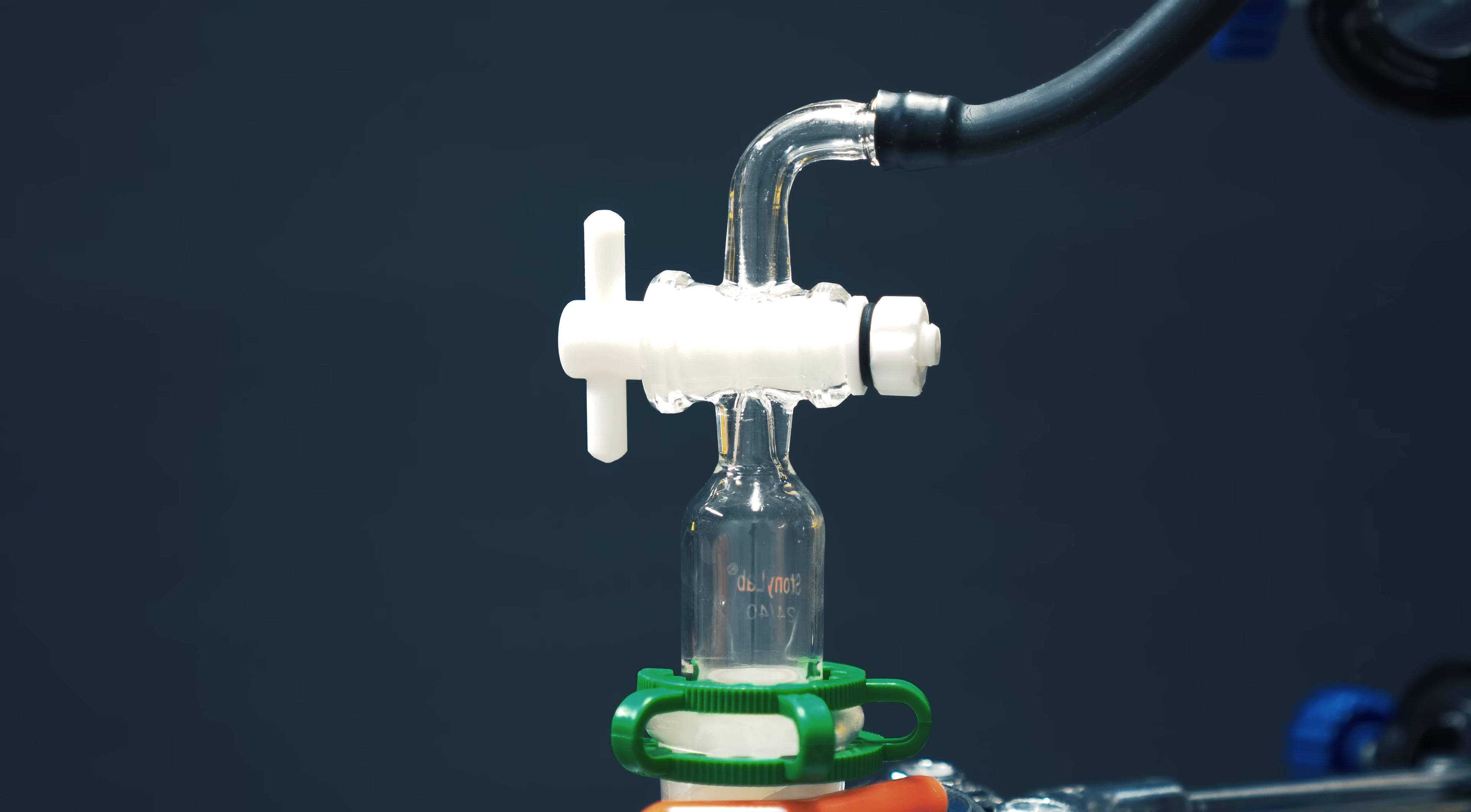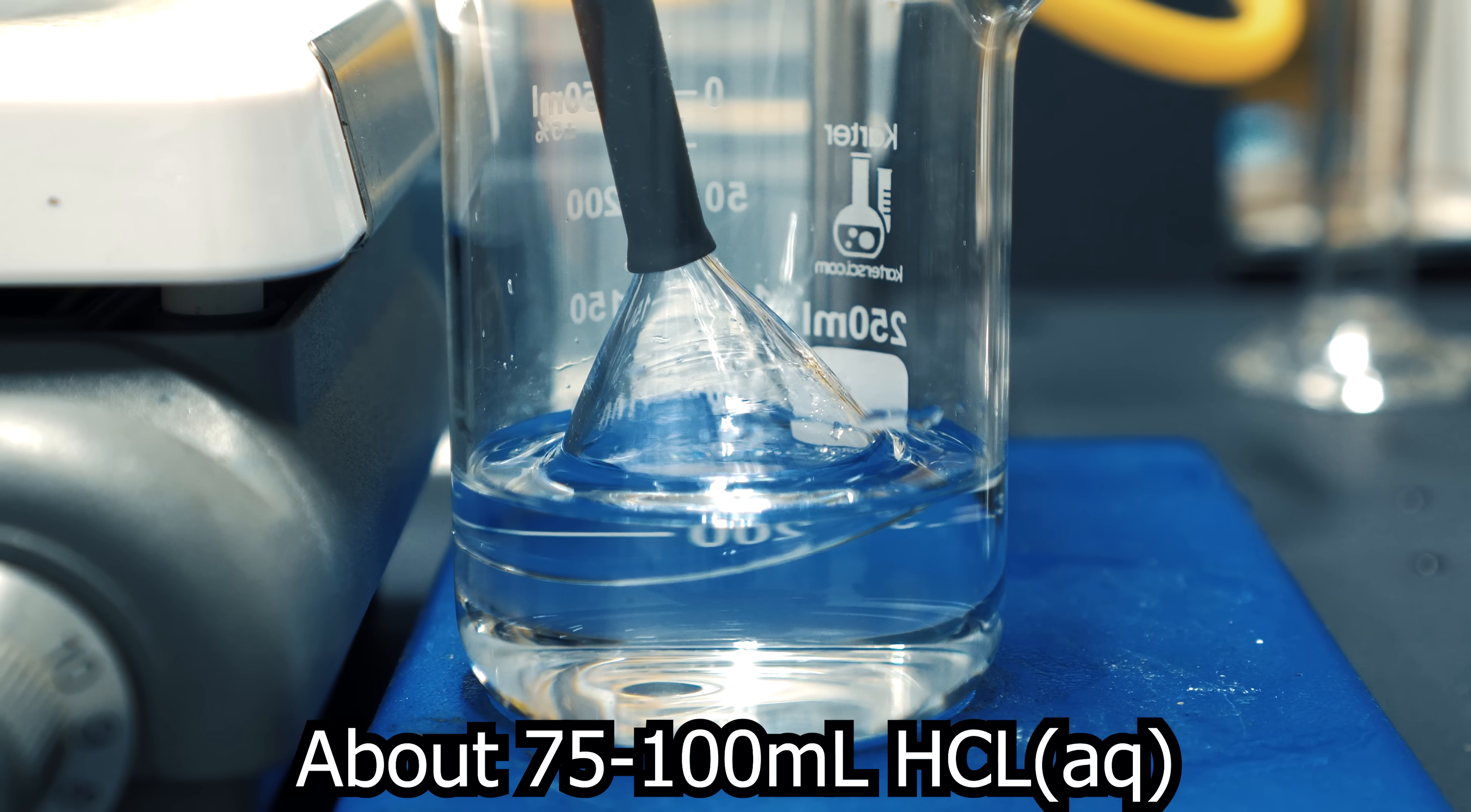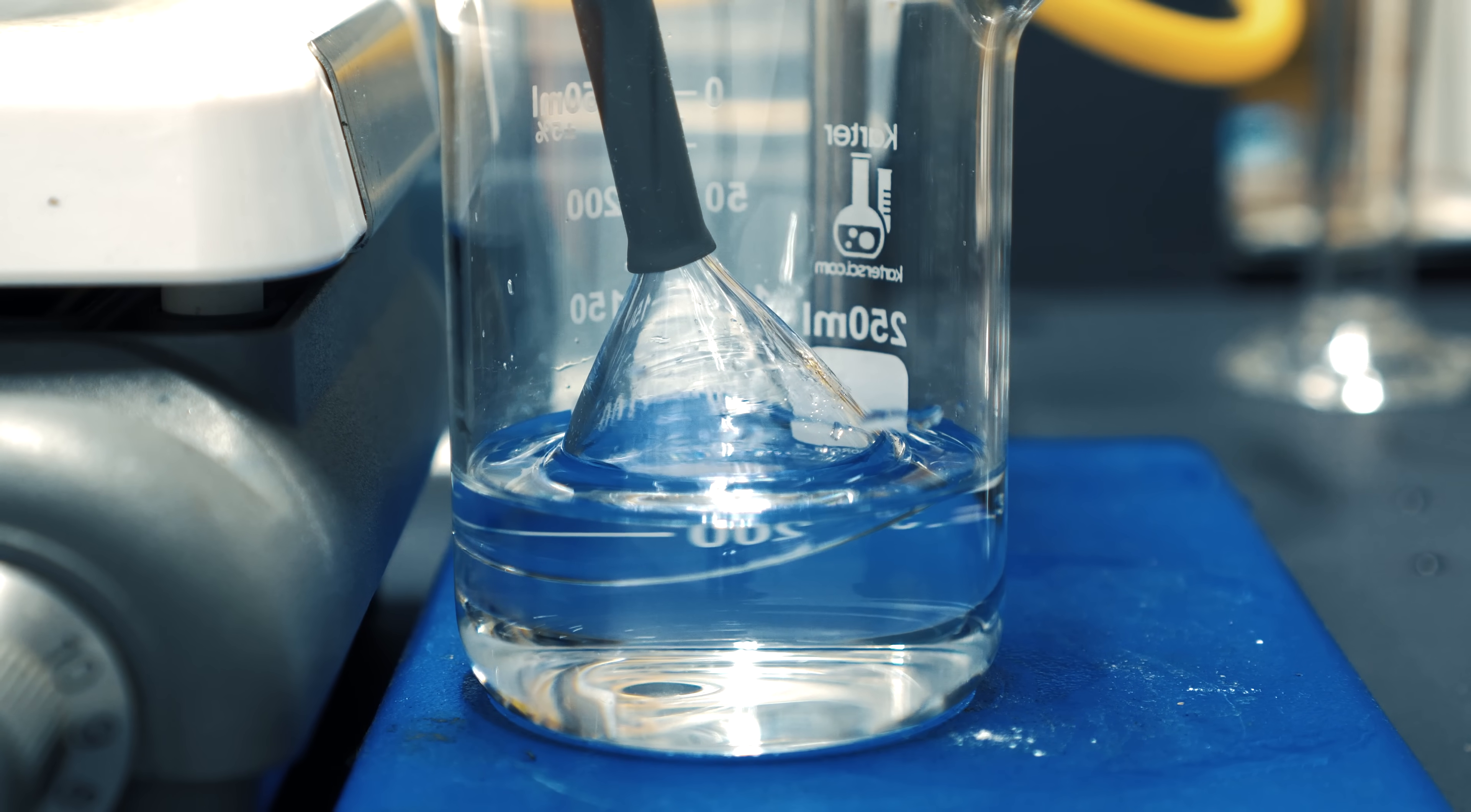I then got ready to bubble my methylamine gas into hydrochloric acid. I used a vacuum control valve with a tube leading out of it. The tube is connected to an inverted funnel and it's lowered into the hydrochloric acid solution.